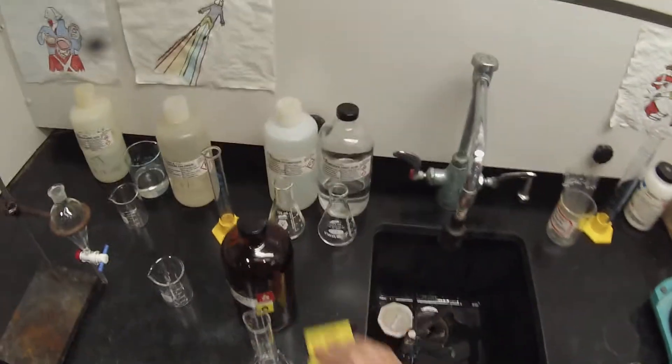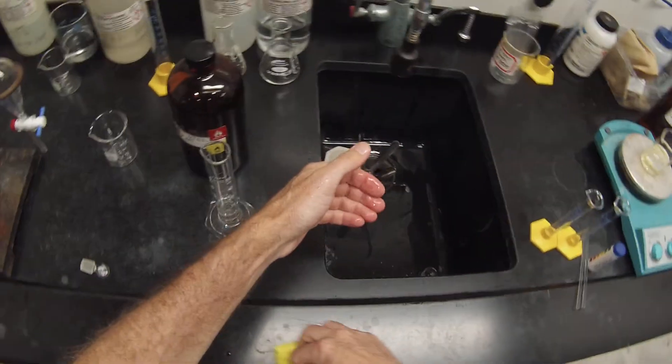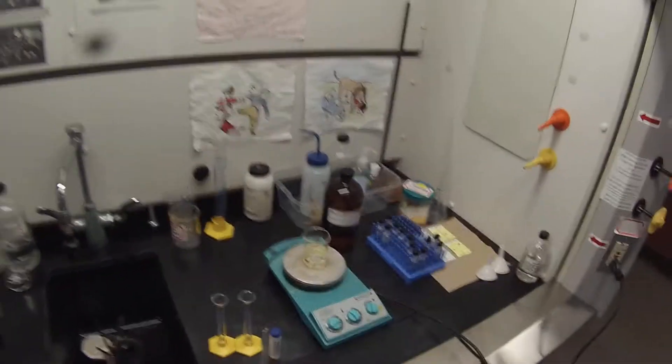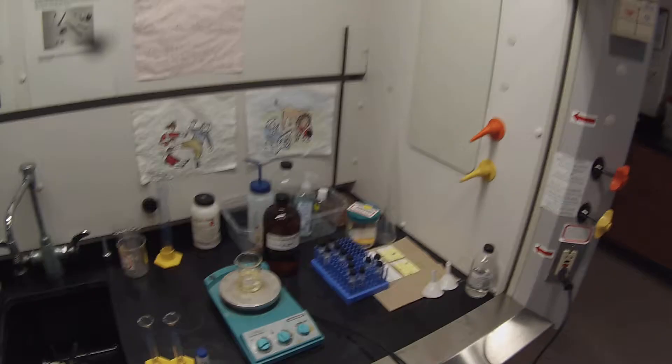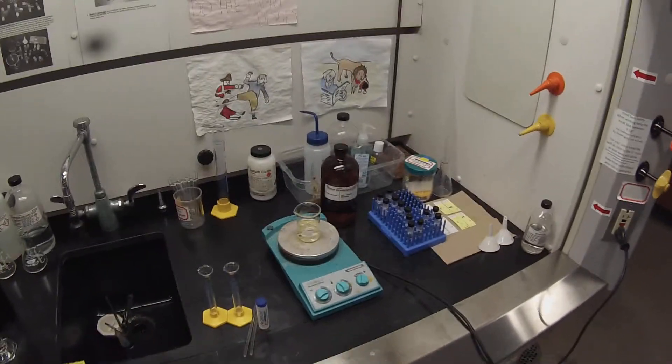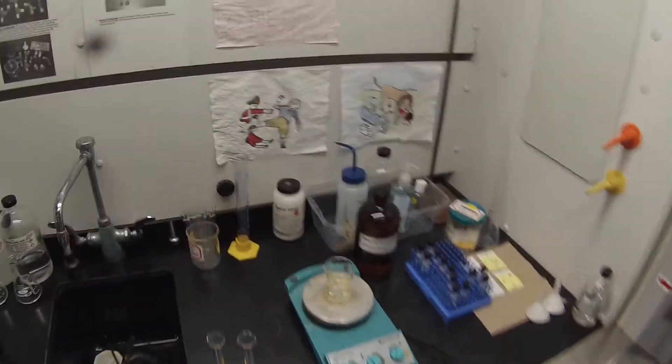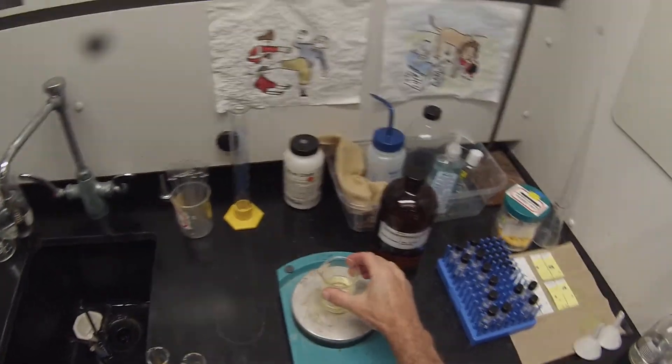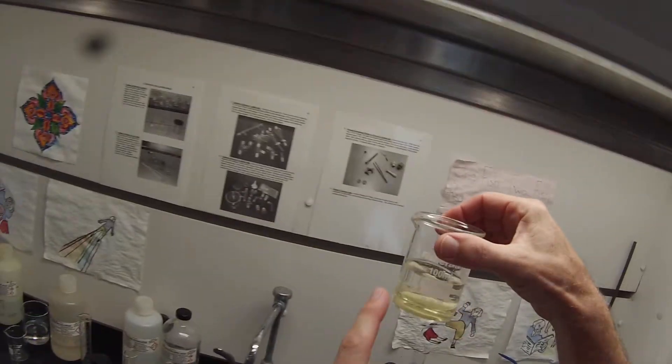I used the diethyl ether because I knew that both vanillin and cinnamic acid were soluble in it. I don't know for sure that they're soluble in methyl tert-butyl ether, but I suspect they are since things that are soluble in one ether solvent are often soluble in another. It looks like that's dissolved pretty nicely.